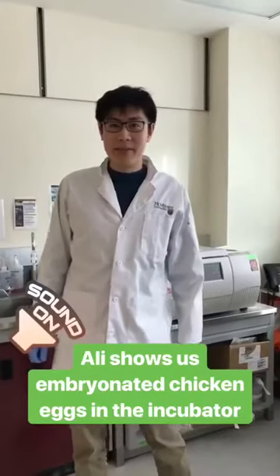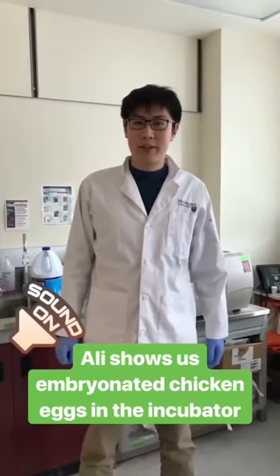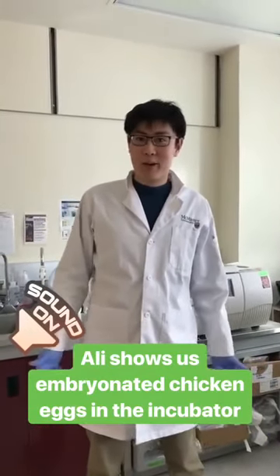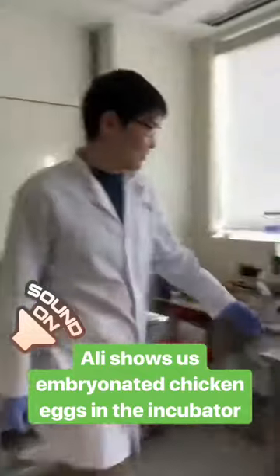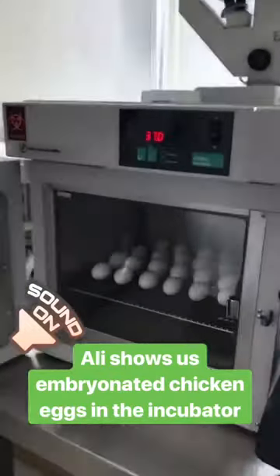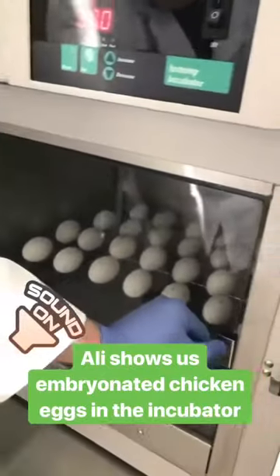Hi, my name is Ali and I'm a PhD student in the Miller Lab. Today we're going to take a look at how we grow viruses. Over here is our chicken egg incubator, as you can see — we've got a whole bunch of eggs.